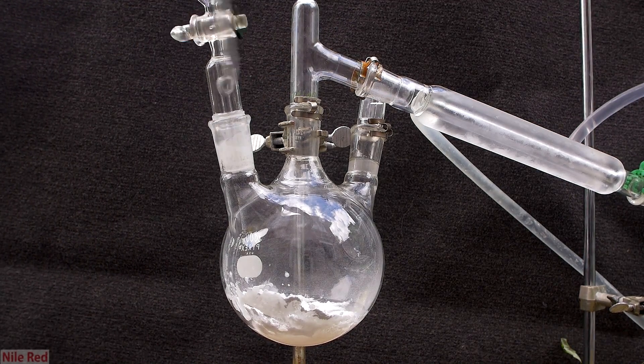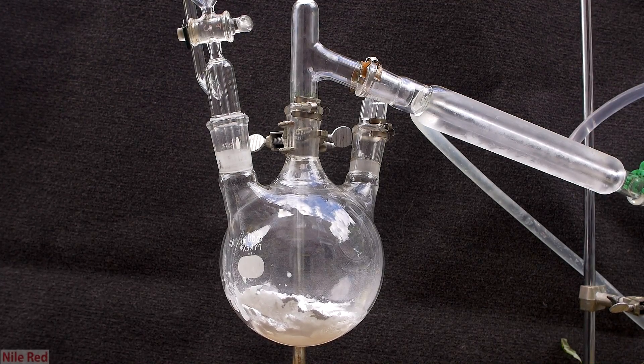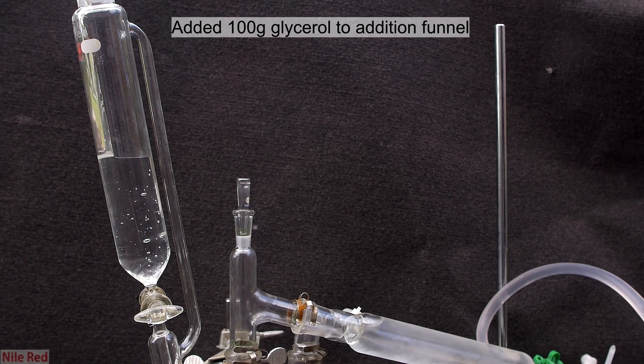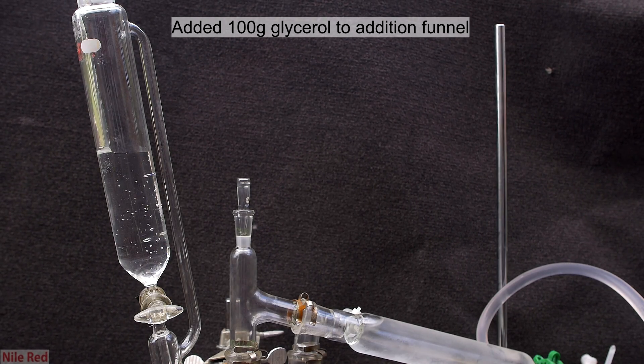To the flask, I attach an addition funnel, and I add about 100 grams of glycerol to it. The glycerol from the addition funnel is going to be added slowly over the course of the reaction.